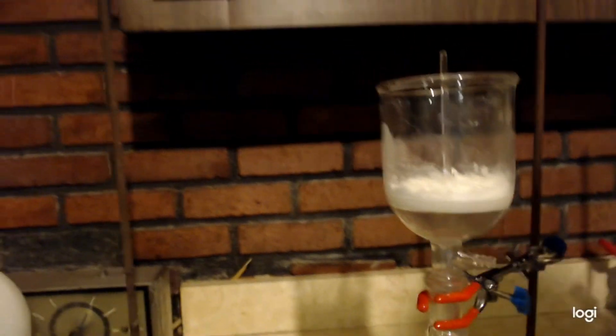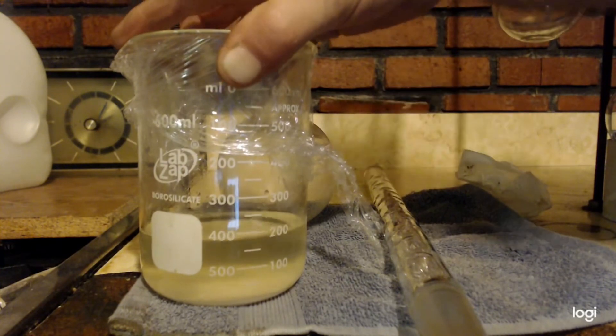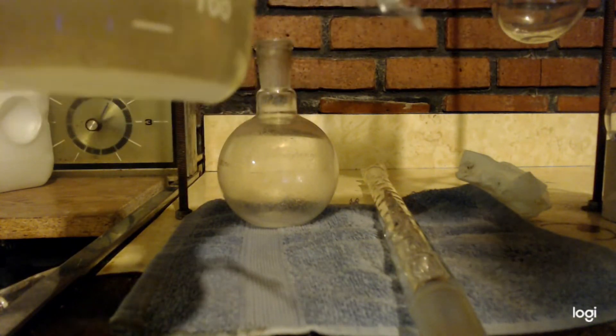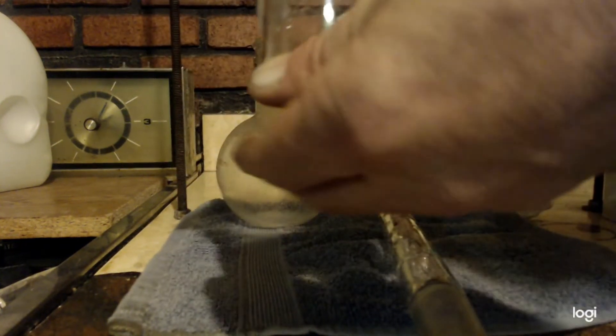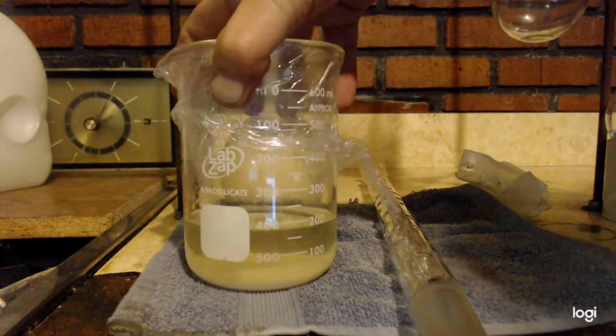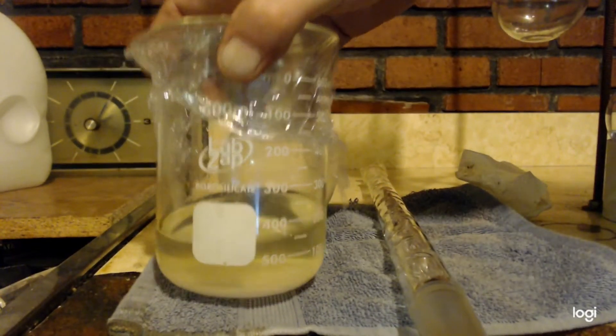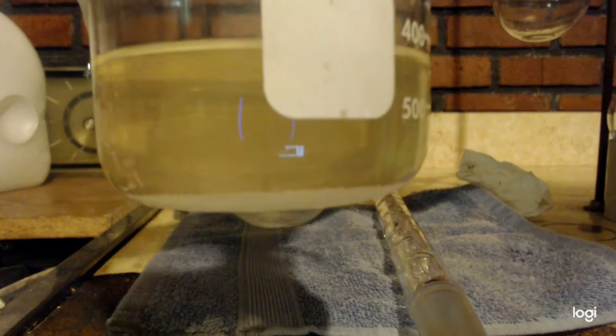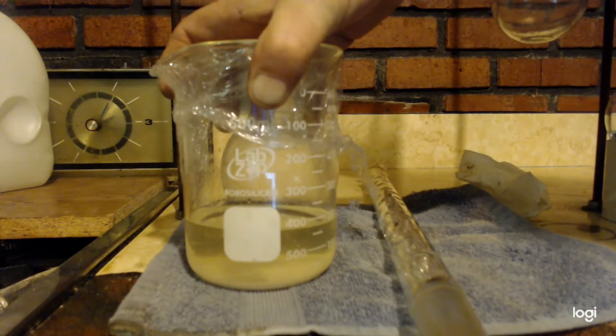Alright, now here, this is the ethanol. There's about 185 milliliters here. You can see stuff is already precipitating out. So we do have something. And it's still warm. Let's see the temp. It's only at 40, 41 Celsius. But we're going to take it all the way down to zero. So a lot more will precipitate out. But for right now, that's it right there. Once I get this chilled down and get ready to filter it, I'll get back with you.